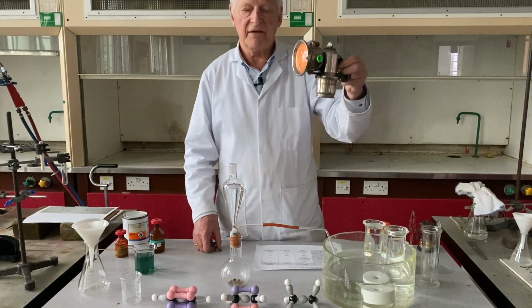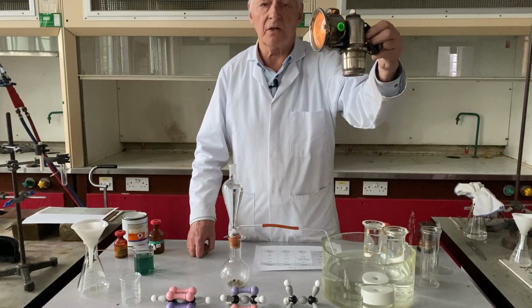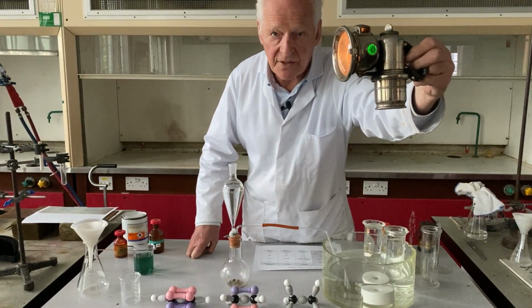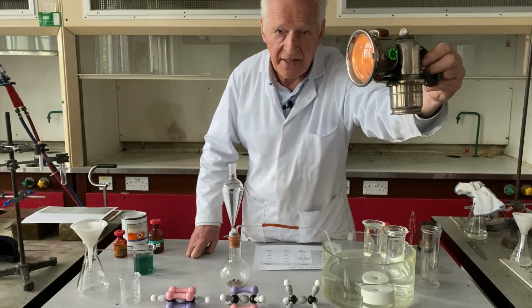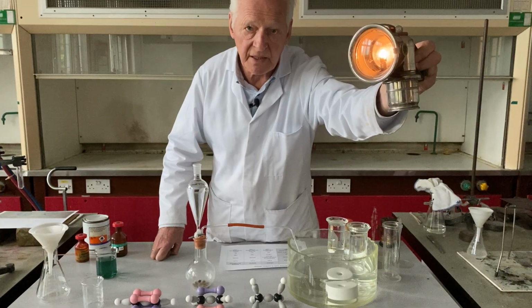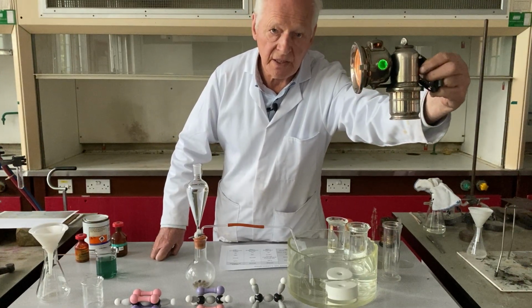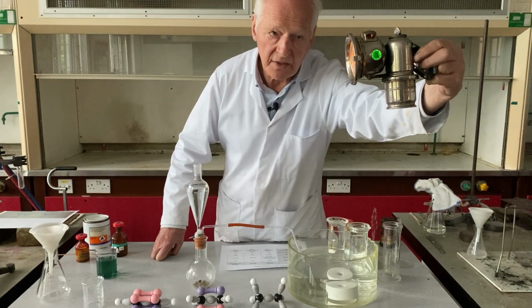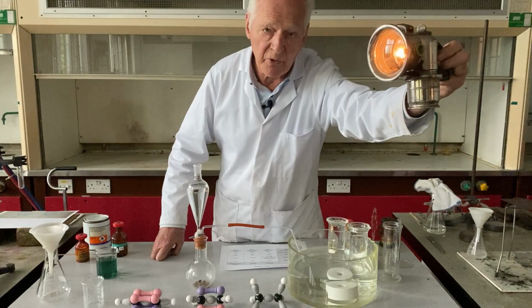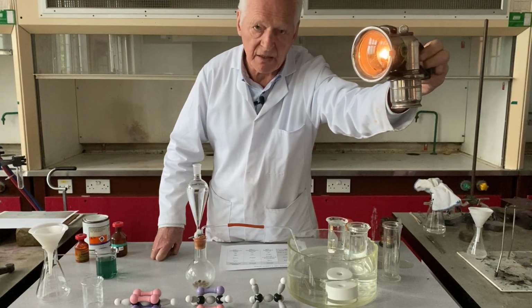Hello. In my left hand, I'm holding a splendid device from the early part of the 20th century. It's a device for providing excellent illumination. And if I now point the lamp to you, I hope you'll be able to see a splendidly luminous flame burning there. And also you can see the green diamond shape there, green precious stones of some kind, emerald light. And this, of course, is in fact an early type of bicycle lamp.